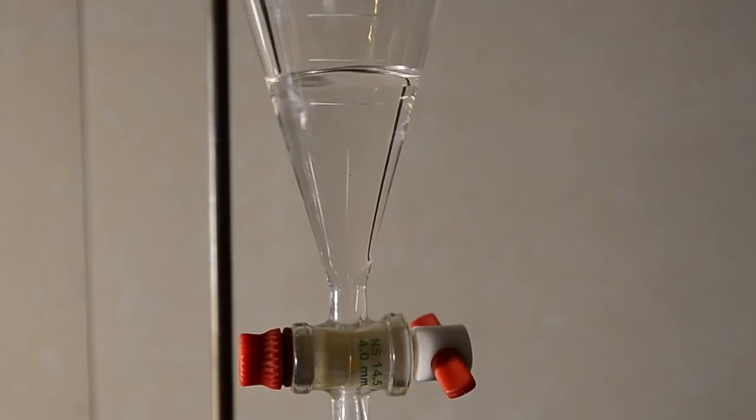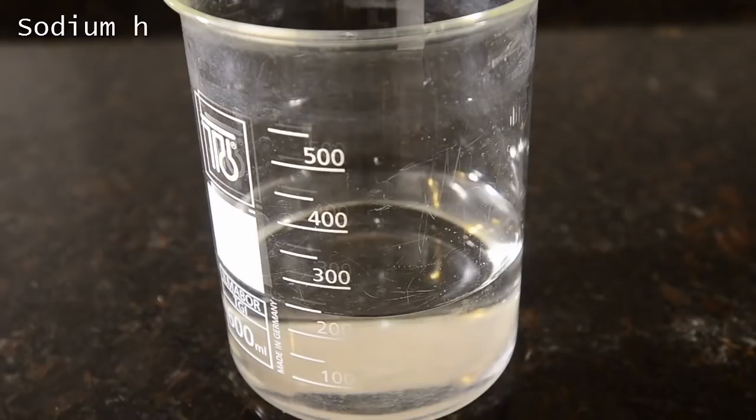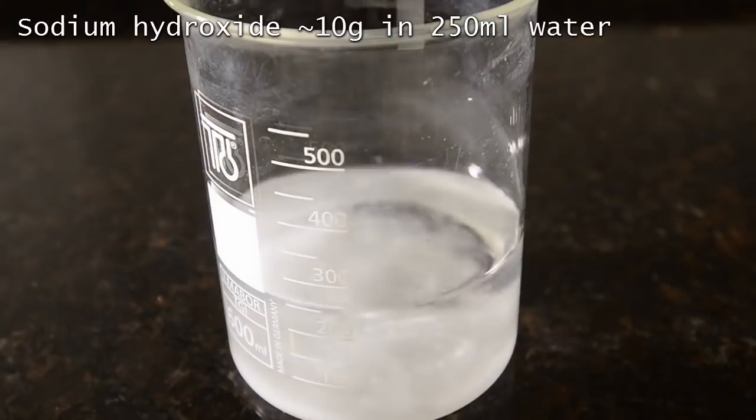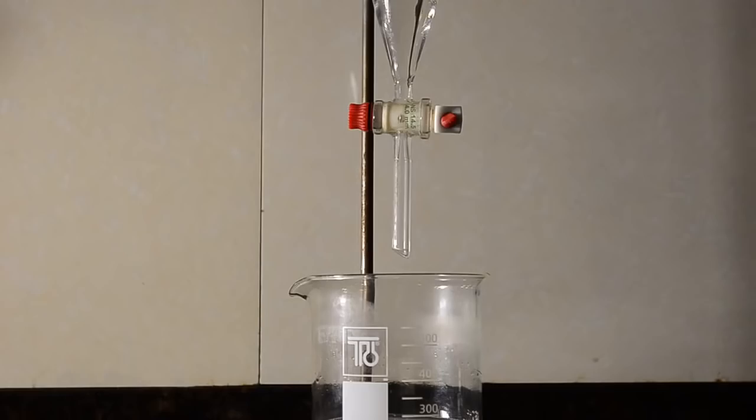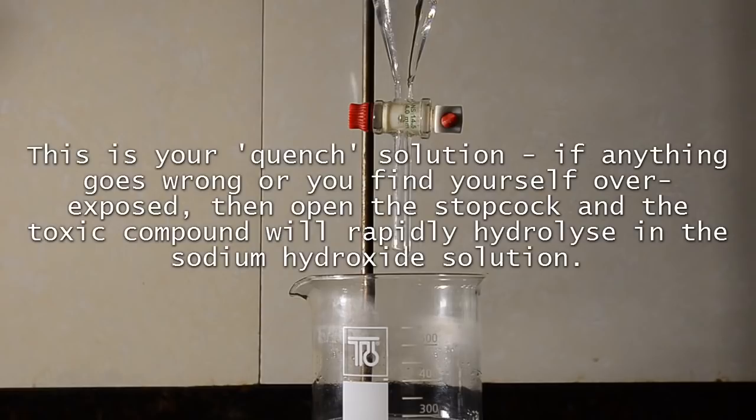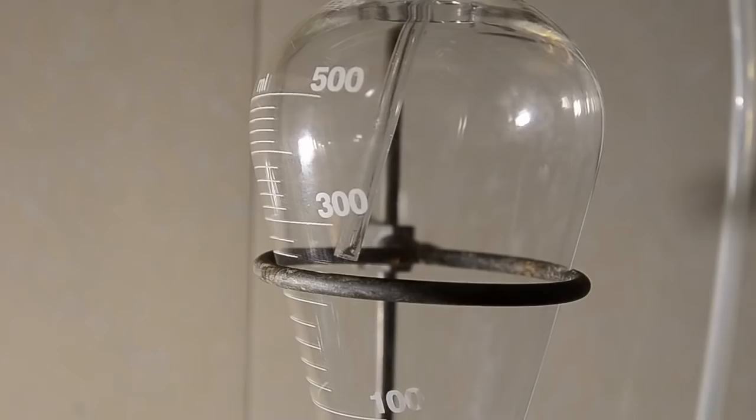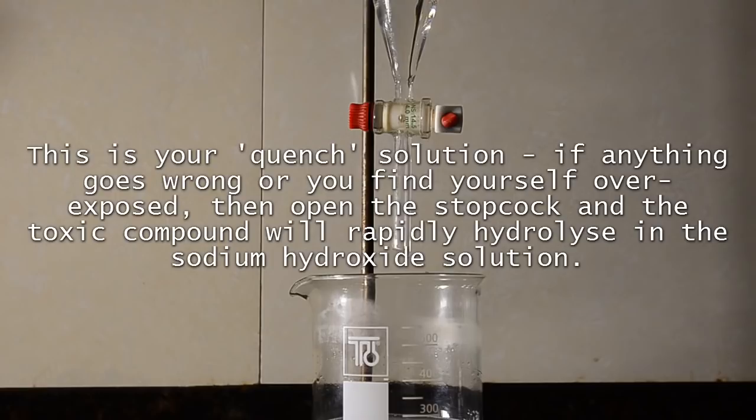Now take a large beaker containing around 250 ml of water and add sodium hydroxide to create a dilute solution. Around 10 grams is enough. Stir this to dissolve, and then allow to cool down. Place this underneath the separating funnel containing the acetone. This is your emergency quench system. In the event that anything goes wrong and you want to stop the reaction, simply open the stopcock and drain the reaction mixture into the beaker, hydrolyzing the dangerous bromoacetone.